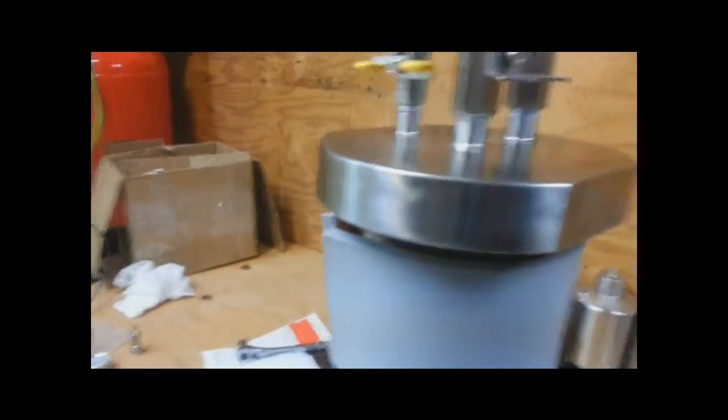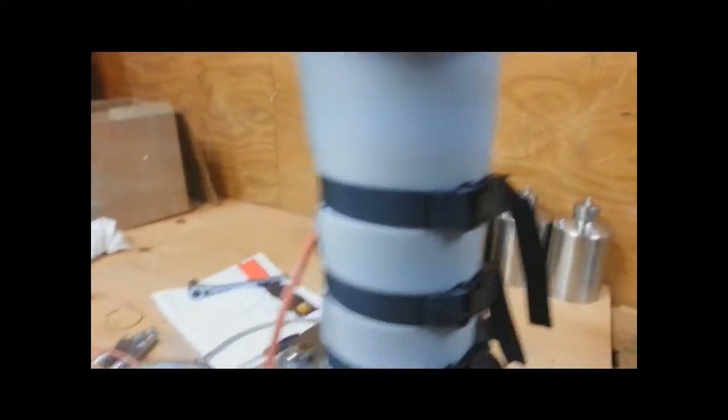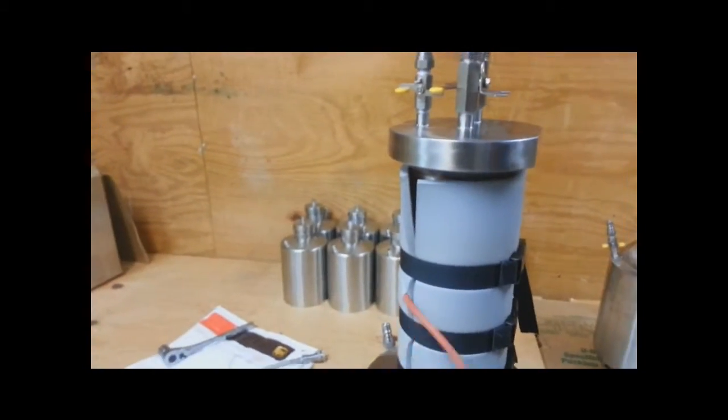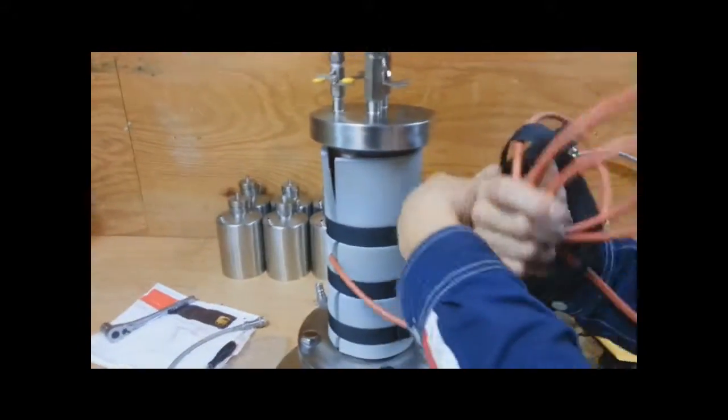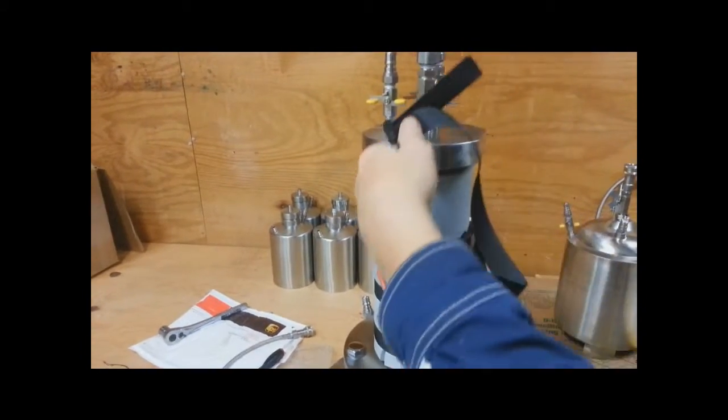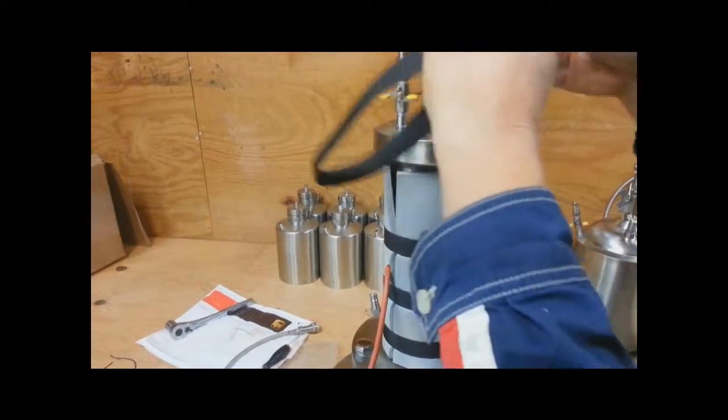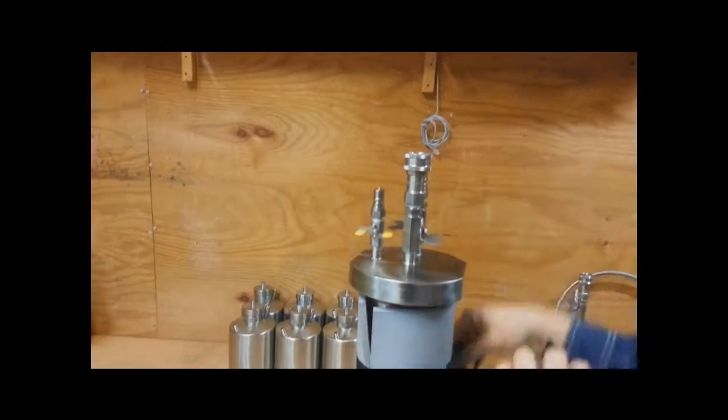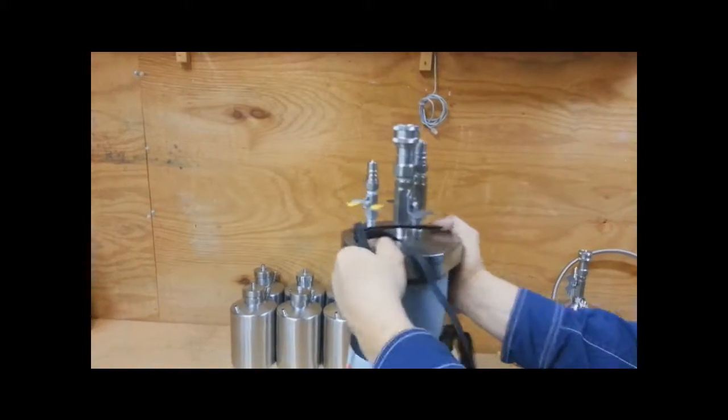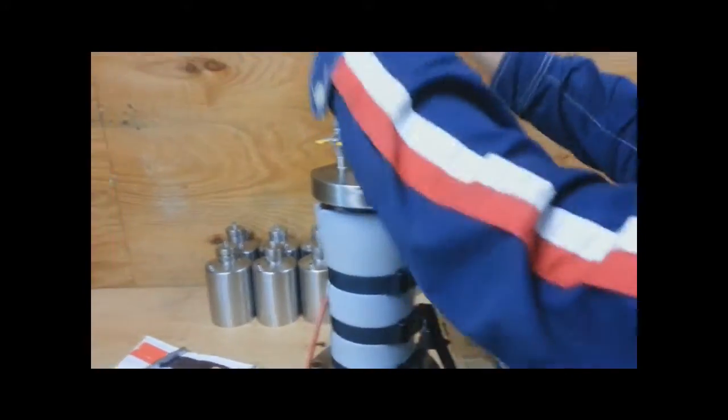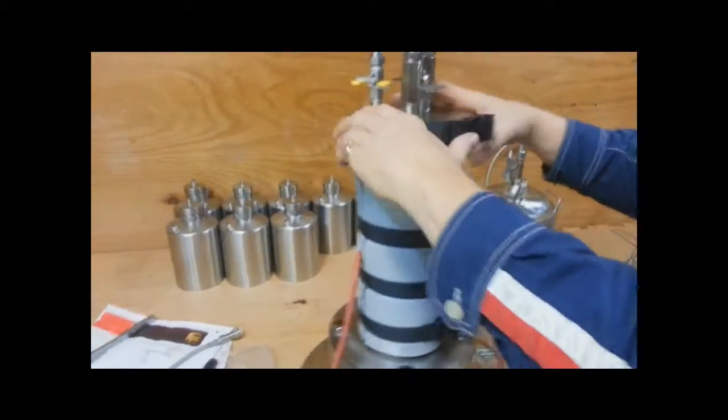So I'm going to put this last strap on. If I were going on to these two lower straps, I would stick this cord through here first and then lower this around it. Make sure the strap is going out the same direction on all sides like these.